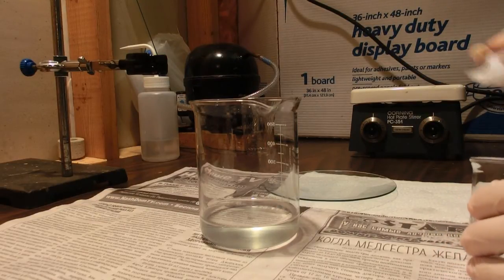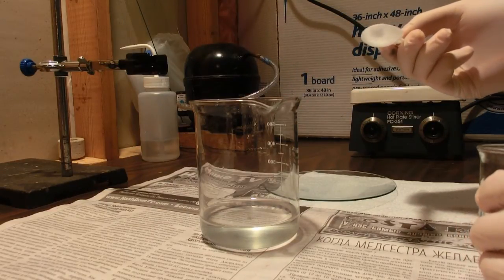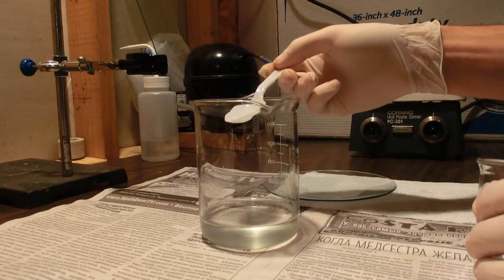So just add a little tiny amount. I've weighed out 12 grams of sodium bicarbonate. It should be about the theoretical amount needed to neutralize the amount of acetic acid I used.